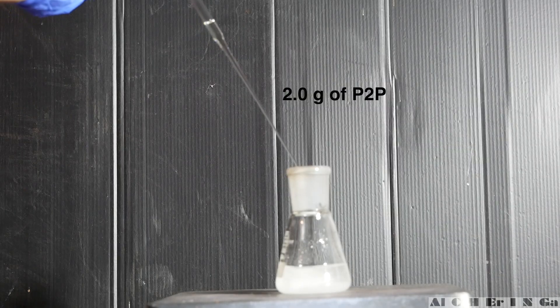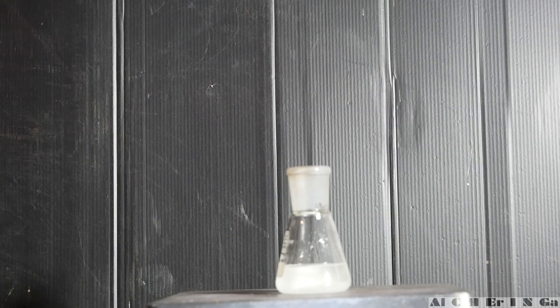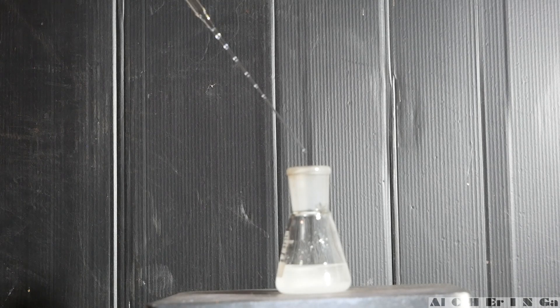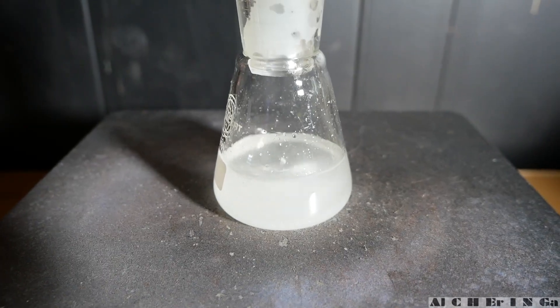To the mixture, add in 2 grams of 1-phenyl-2-propanone. The mixture turns cloudy.